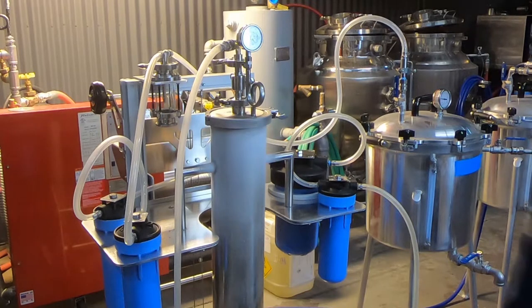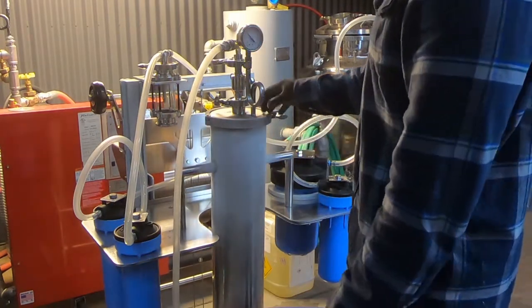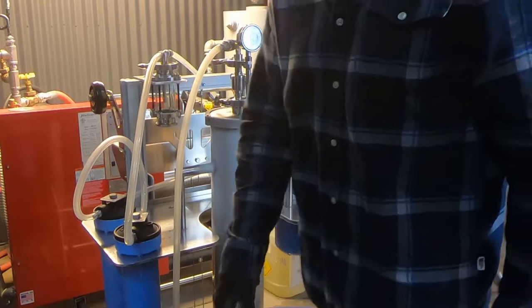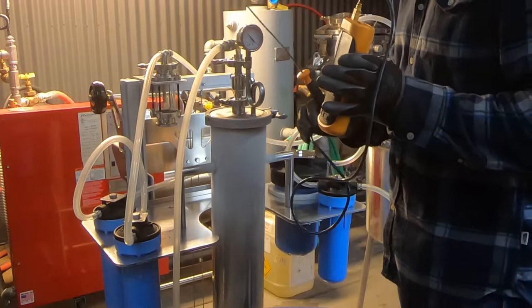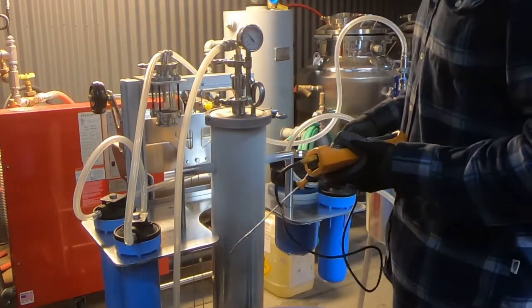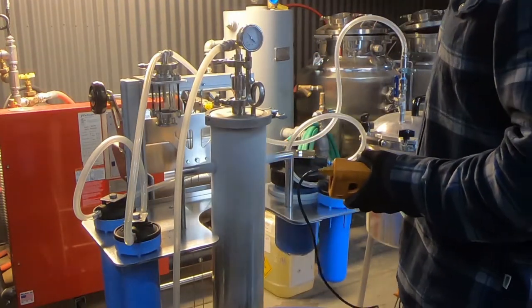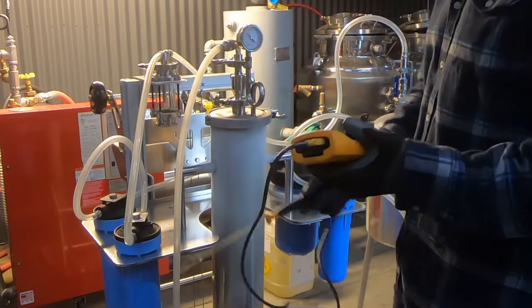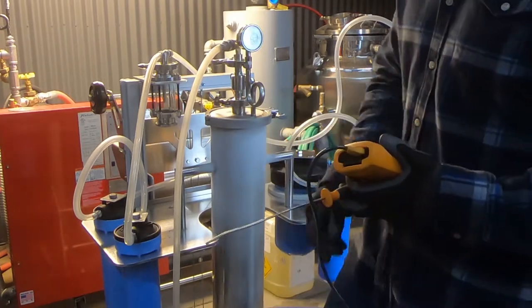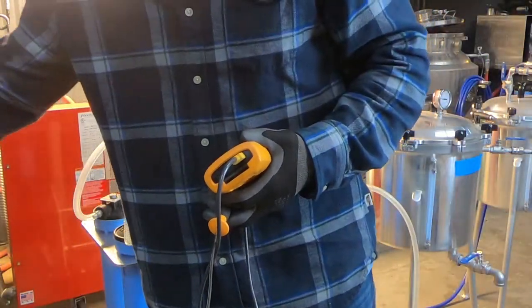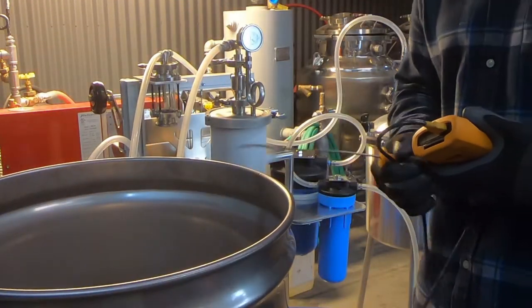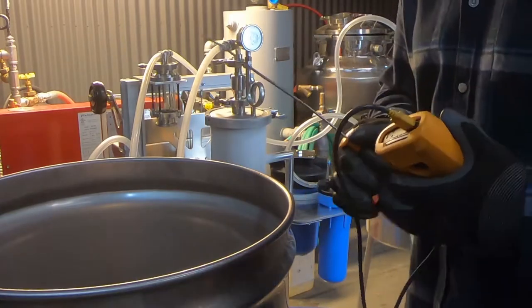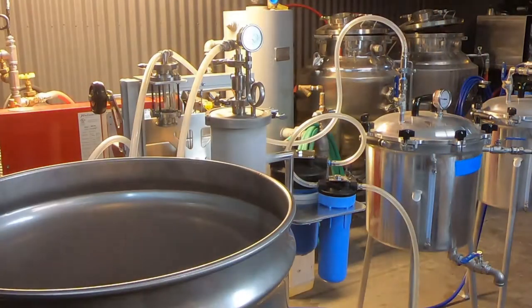I actually forgot to show you guys the temperature. I use one of these Fluke thermometers to check the temperature, but I've done it so many times I kind of have a feel for how much it takes. I'll show you guys the alcohol. We're gonna get our alcohol prepped. I just use a 55 gallon drum and we'll pour it in there, we'll pour the nitrogen in. That'll be as easy as that.